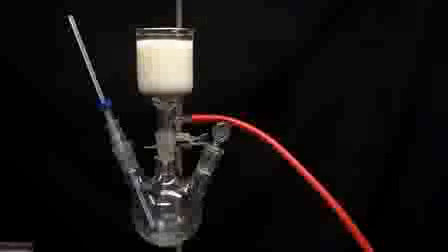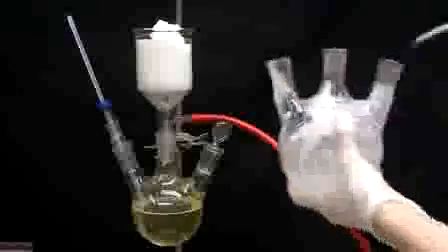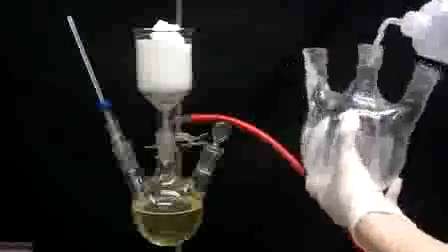After we let it sit in the ice bath for a little while and we precipitate as much of the ammonium chloride as possible, we then need to filter it off. I used my glass fritted filter and I directly filter the liquid into a 500 milliliter flask. It takes a little while, but eventually everything is added to the filter, and then I wash my 1 liter flask a few times with water. When we do these water washings, we want to use a minimal amount of water because we're eventually just going to need to boil it off again.